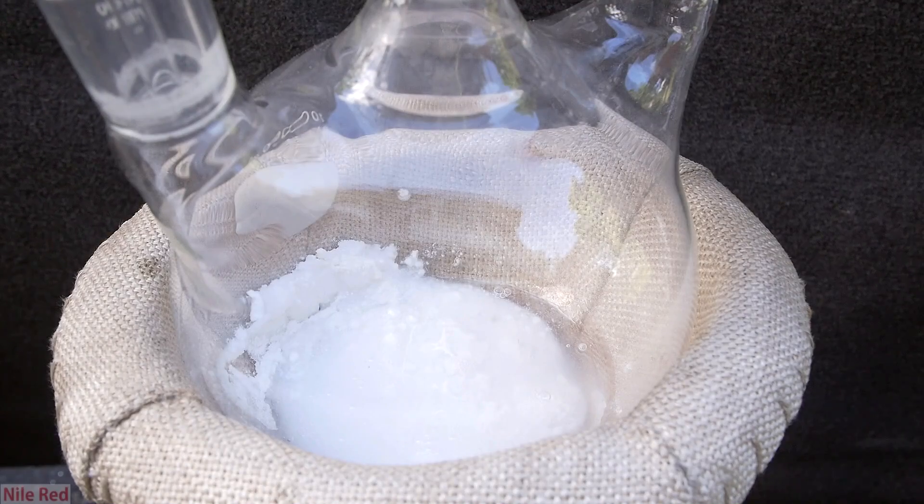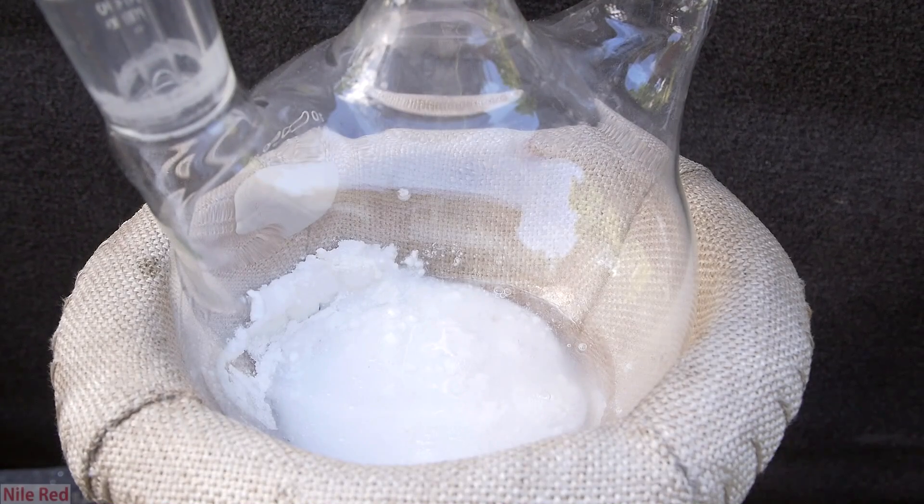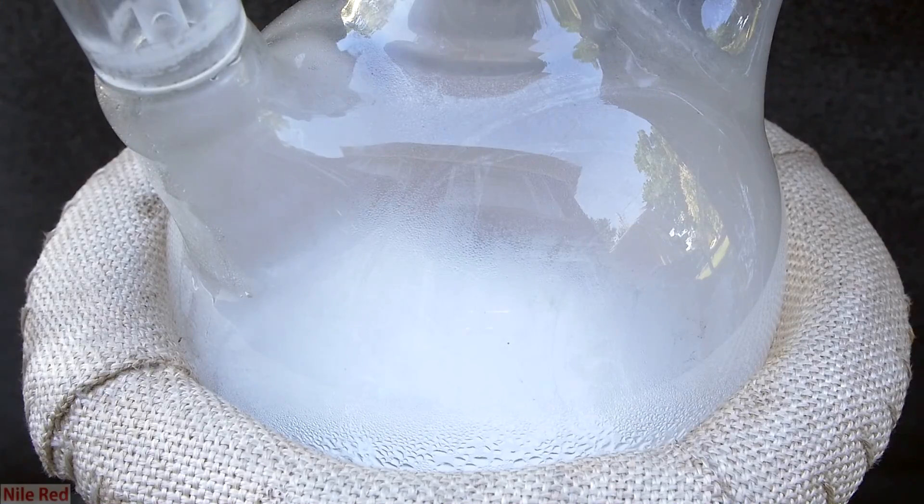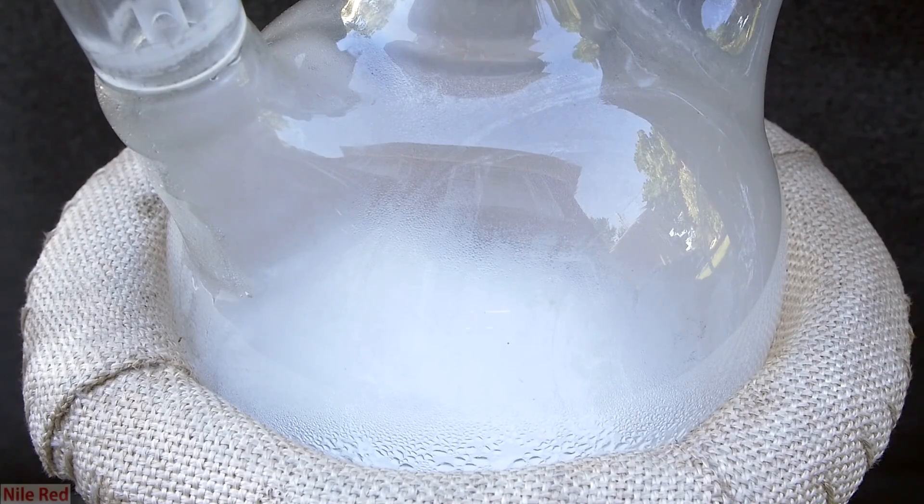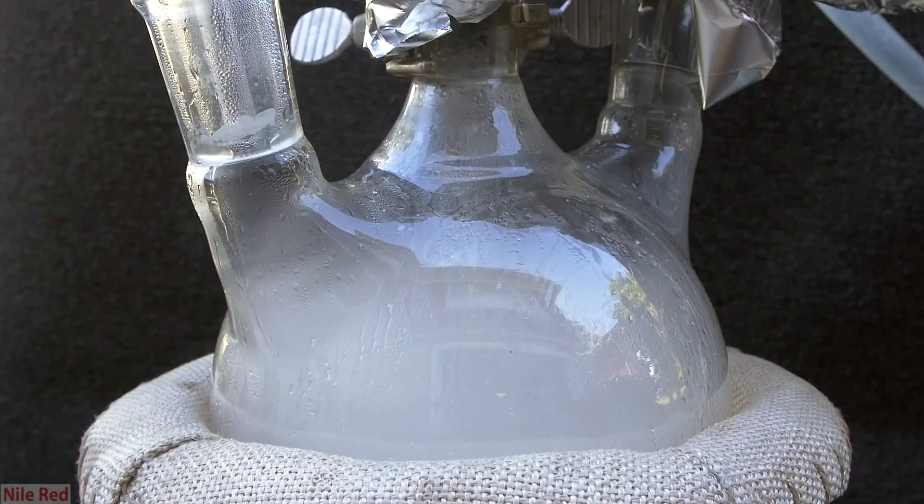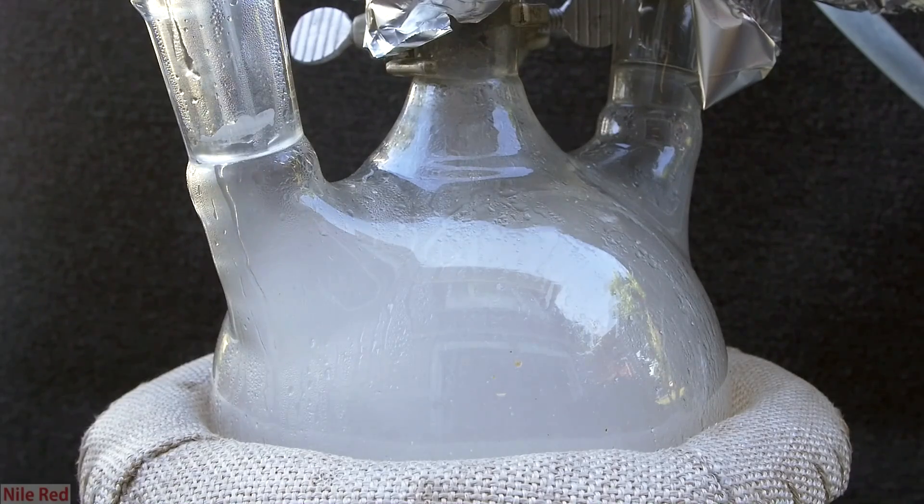To start things off, we can crank the heat up a little bit, and initially, we really don't see much of anything happening. However as things heat up, a lot of water condensation will start to come off, and the flask will get cloudy. When we look at the flask from the side, we can see that it's producing a lot of white vapor.